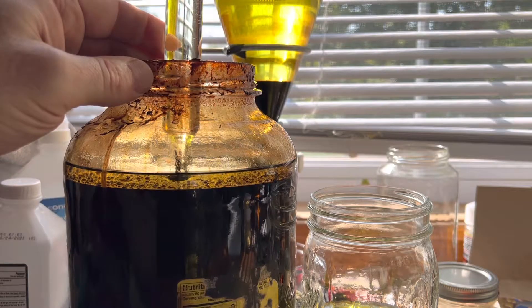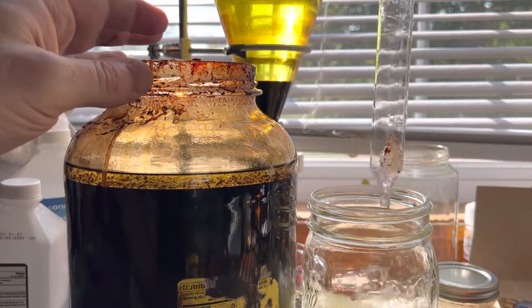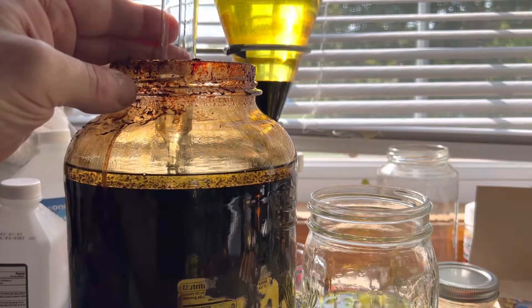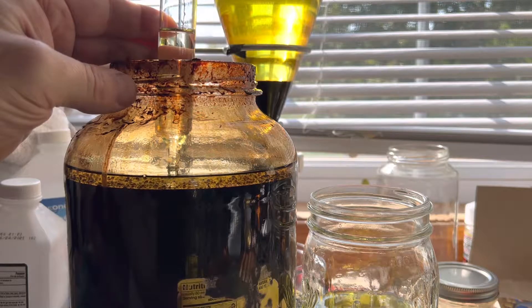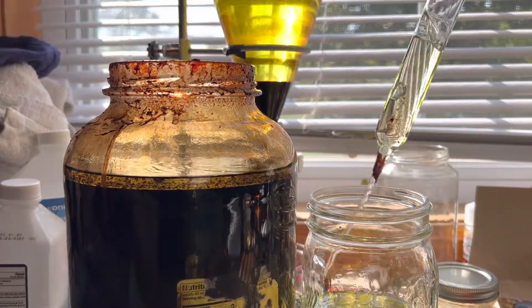Oops — let's push that back down. Try to be a little careful. Slowly fill the siphon. There we go — it's still clean. But the next one, maybe. Very slowly. At this point it's kind of a losing battle. You're going to get some up there. So I'm going to push that out and just take this clean right here.